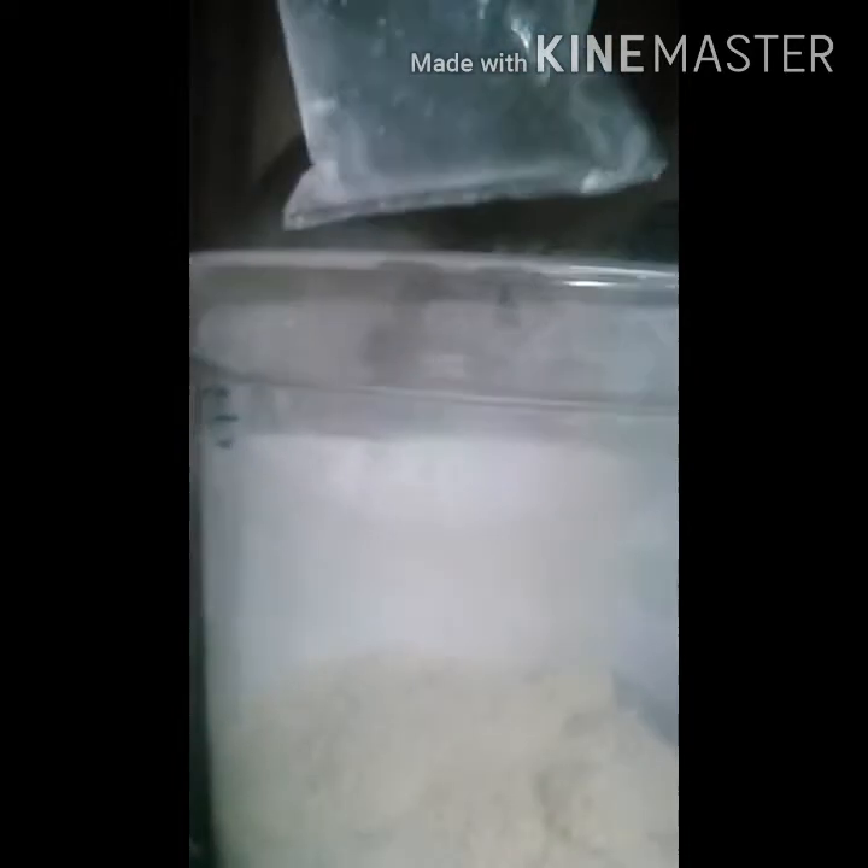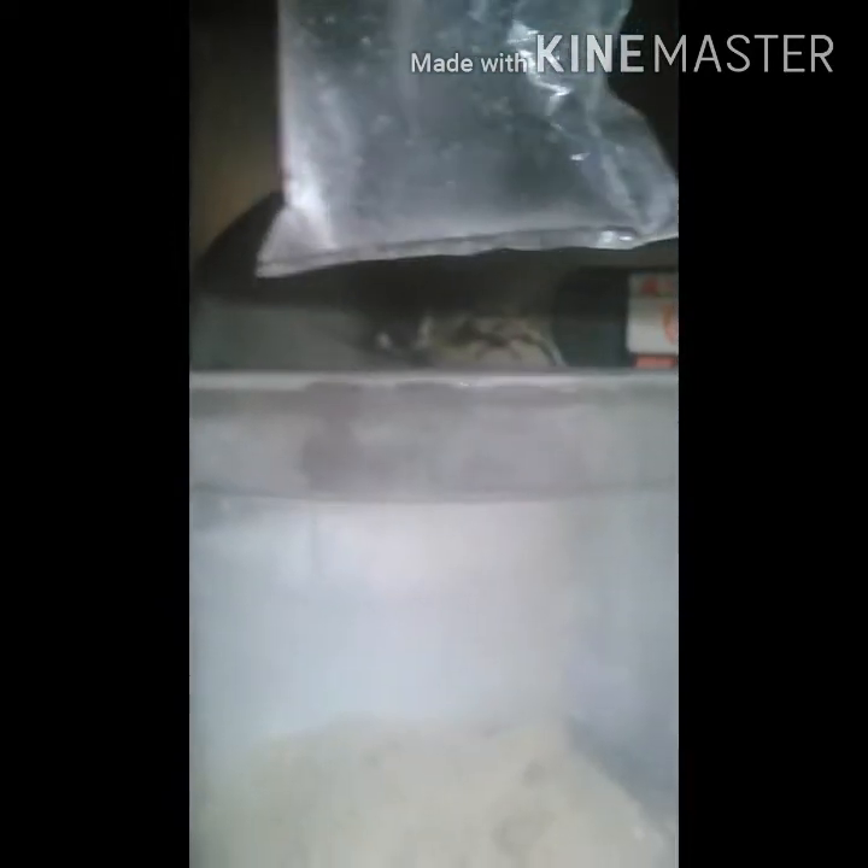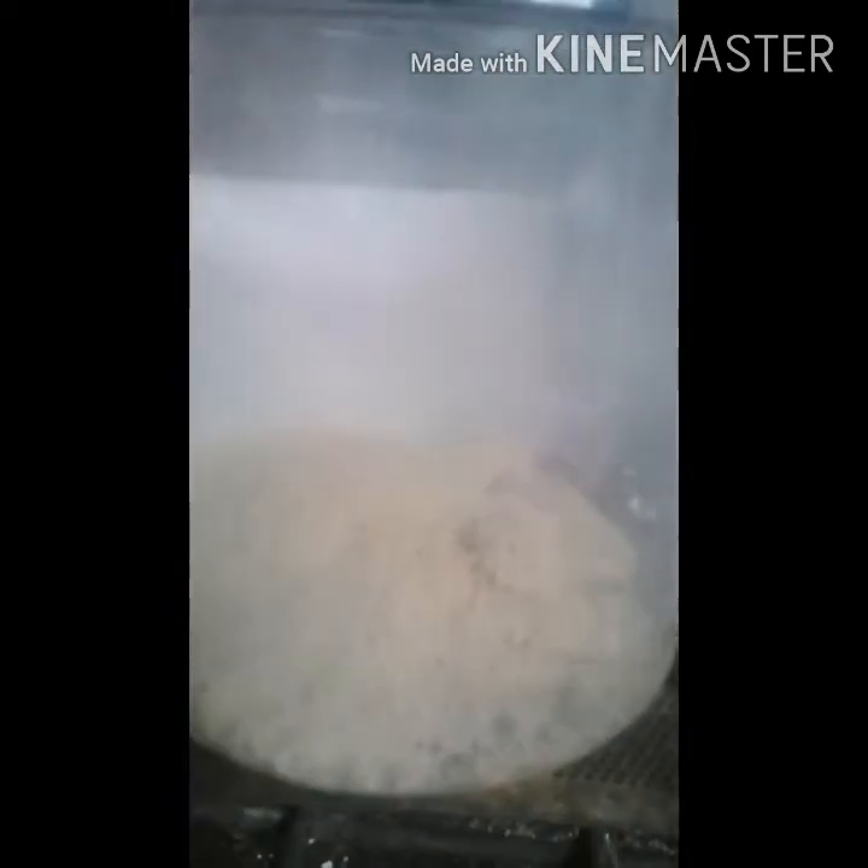Each one of those comes with a bag of water. I'm going to add one of these bags of water and stir it, then decide if I need to add the second bag to see how much will break down into the water — because the calcium won't dissolve but the ammonium nitrate will, and that's what I want. This reaction is endothermic also.